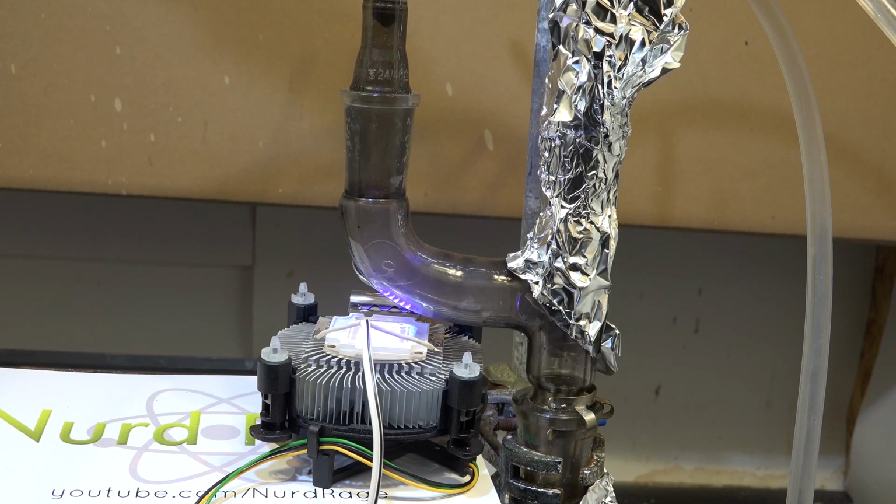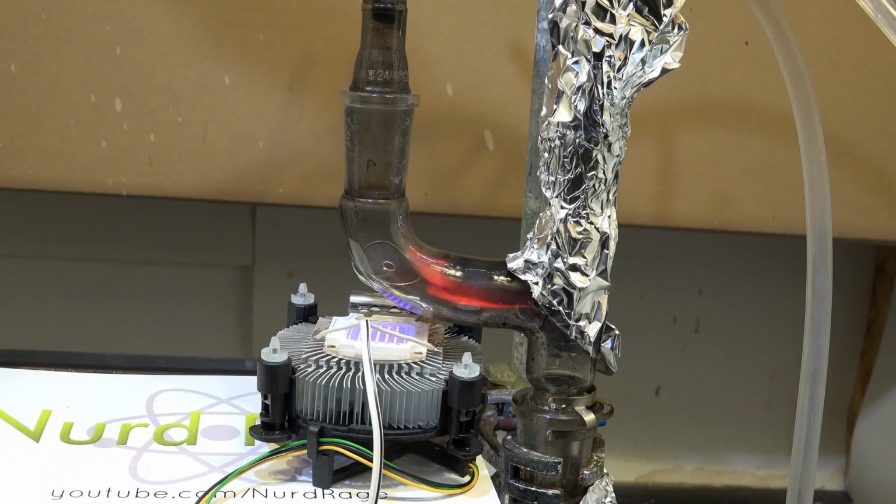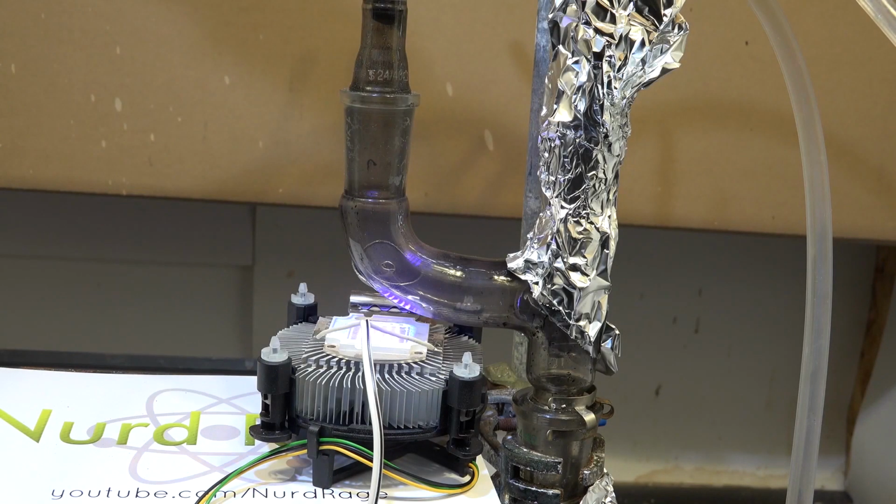Now you'll notice the Claisen adapter being filled with black soot. This is because we're having small chlorine fires, and you can see them as tiny little orange flashes. That orange streak is a chlorine fire. I'm adding too much chlorine too fast, and that's creating a mixture rich enough to burn. Now all the oxygen has been purged out by the continual reaction, but chlorine itself is a powerful oxidizer, and thus it can support combustion in some instances.